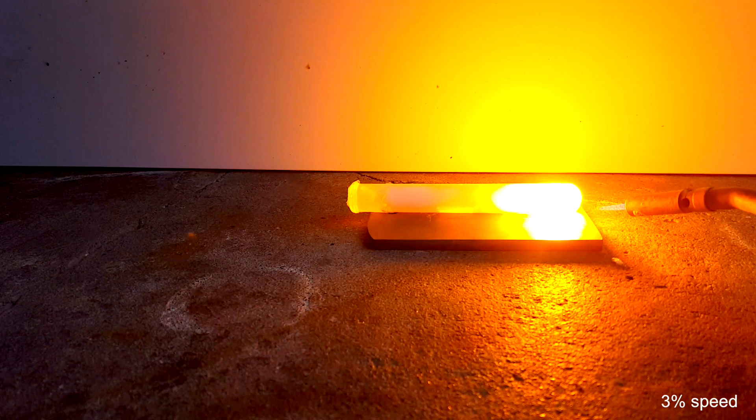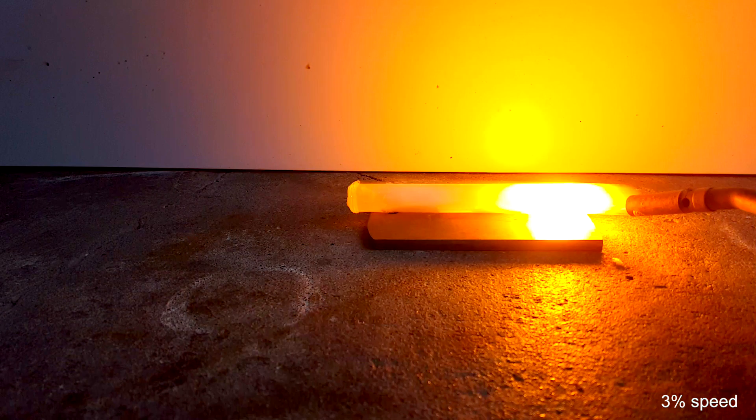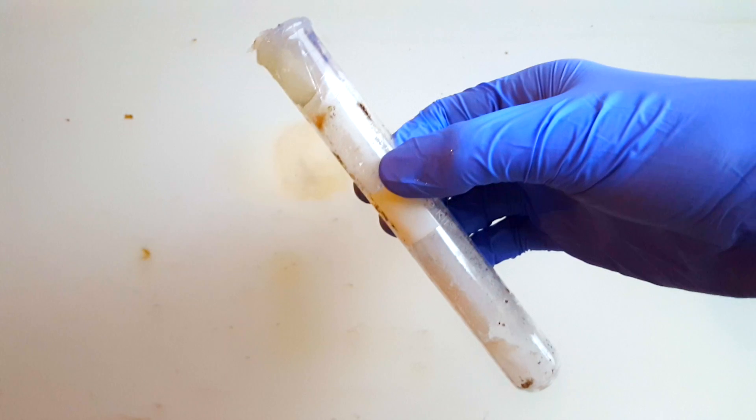Within 4 frames, the tube is out of sight. In the side shot that I got, you can see the glow from the tube first. Then, as soon as the tube takes off, you can see the light from the tube is above the ground. This leads me to believe that the tube actually went airborne, which means this could be used as an effective propellant.